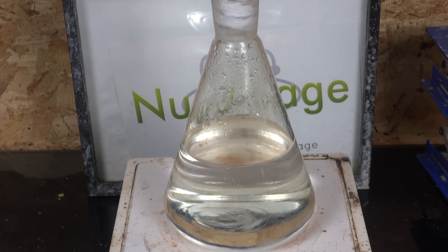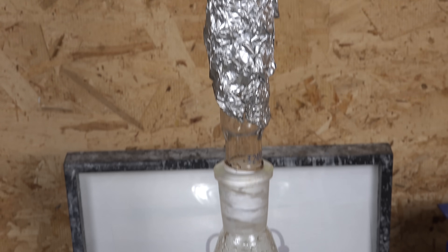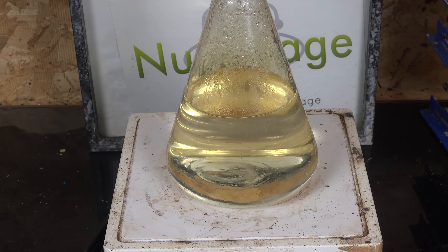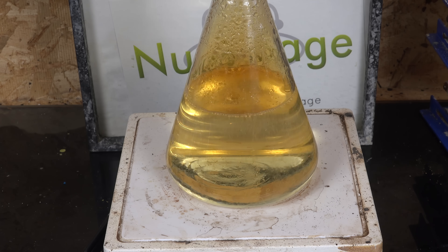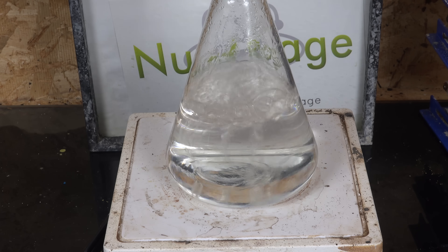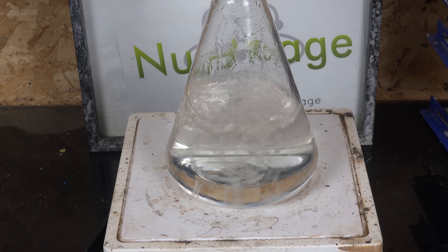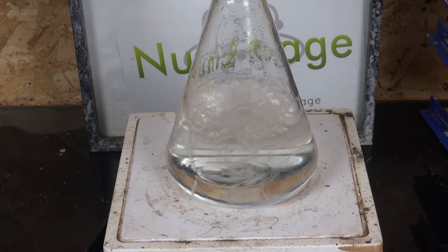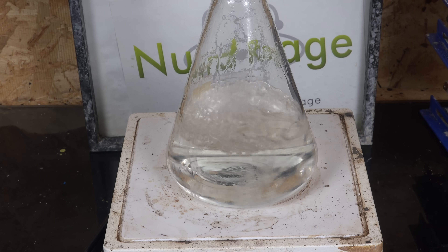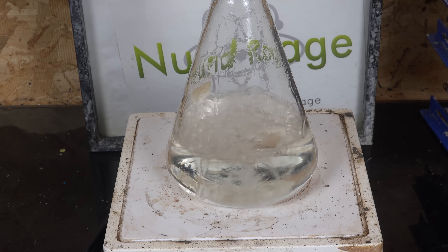And here is our distillate. It's pretty dilute so I'm going to install another Vigreux column and once again boil off the excess water. I didn't boil off more water earlier because I wasn't sure how much I needed to boil off — I didn't know how much unreacted precursor reagents there were, so I couldn't just eyeball the volume. But now that we've distilled it, we know this solution is entirely nitric acid and water without any salts or reactants. So we can confidently boil off more of the water. Assuming we have a perfect yield, we'd expect to get about 150mL of concentrated azeotropic nitric acid. So we boil down to about 200mL so we can do a density check.